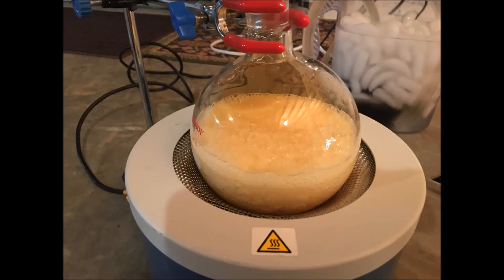Eventually, the nitrogen oxides will clear up, and you will start to distill off nitric acid.